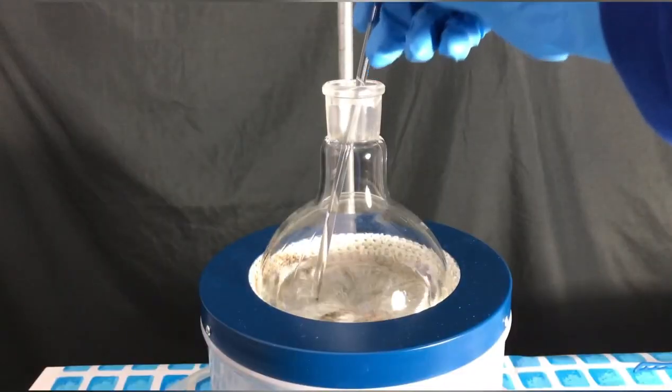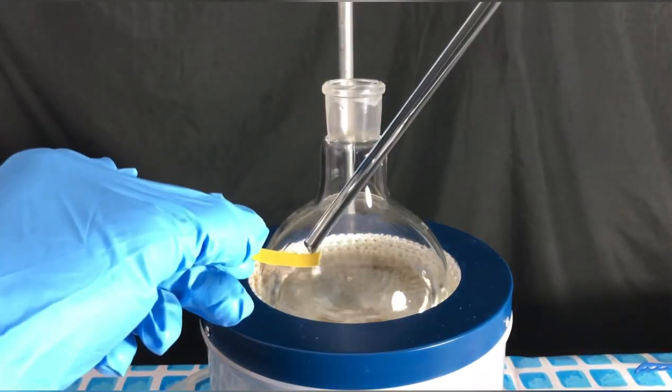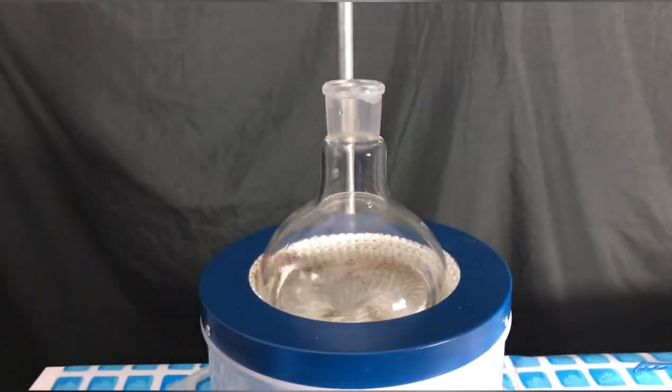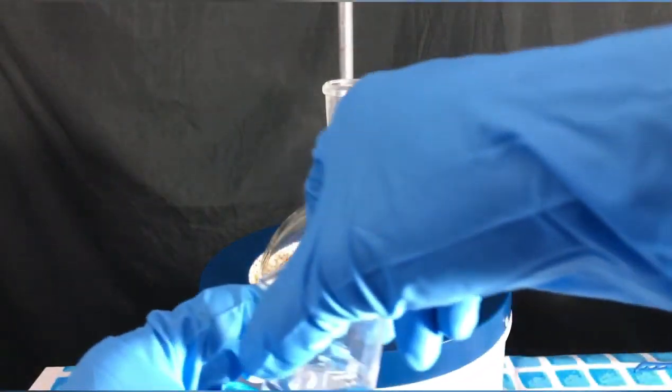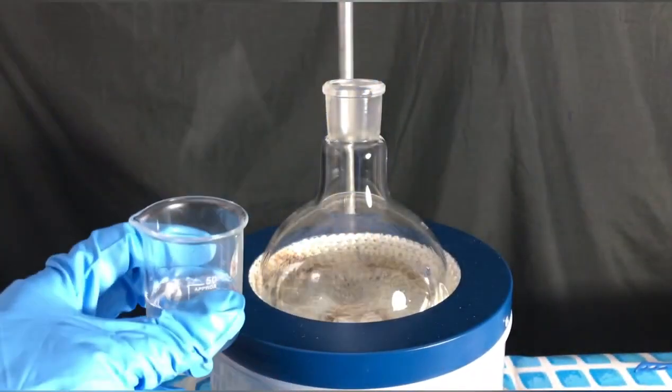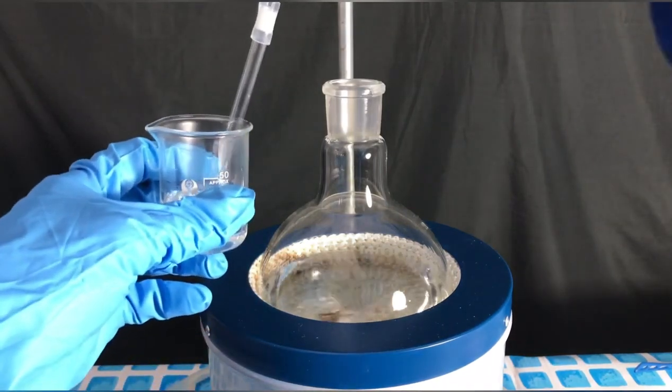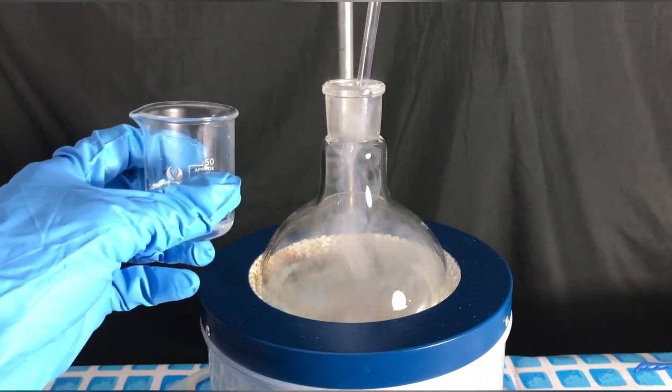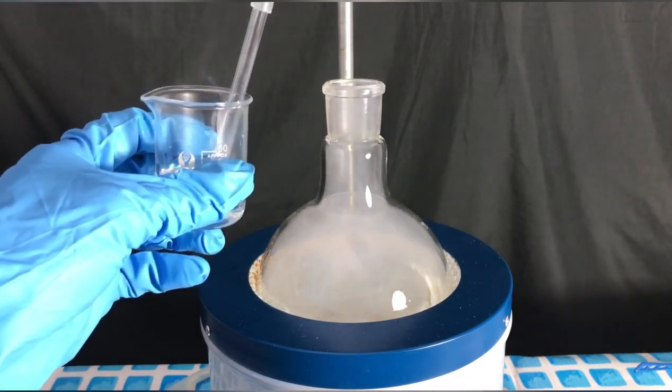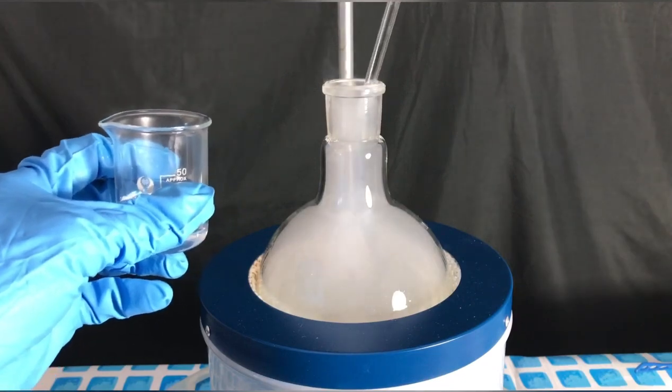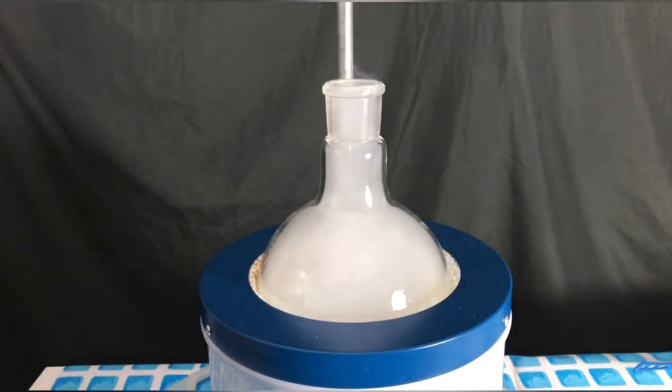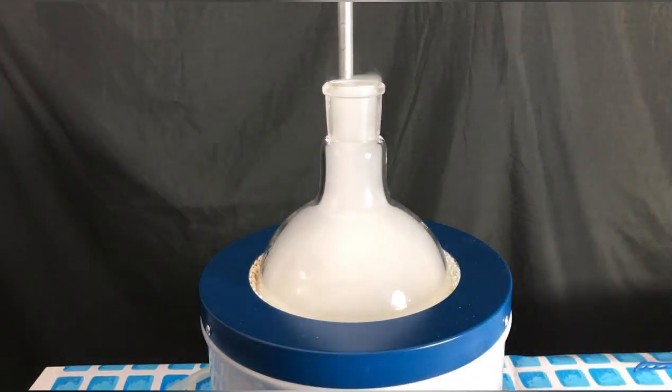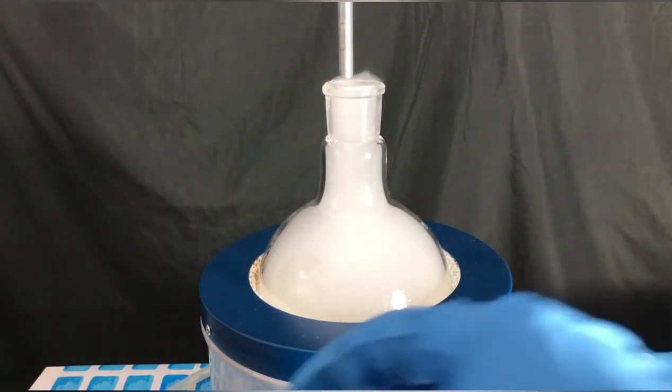Now the solution has to be acidified. The solution is basic because sodium ethoxide will react with water to form sodium hydroxide. The sodium hydroxide will in return react with the barbituric acid forming sodium barbiturate. Because we want barbituric acid, we have to add hydrochloric acid to turn the solution slightly acidic. Sodium ethoxide and sodium barbiturate will react with hydrochloric acid to form sodium chloride and barbituric acid.